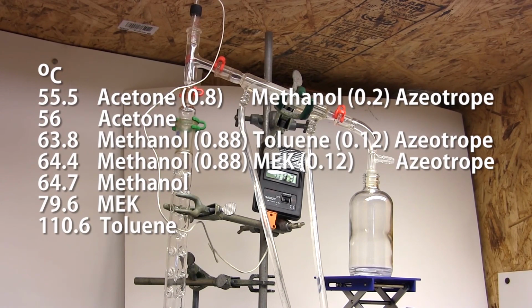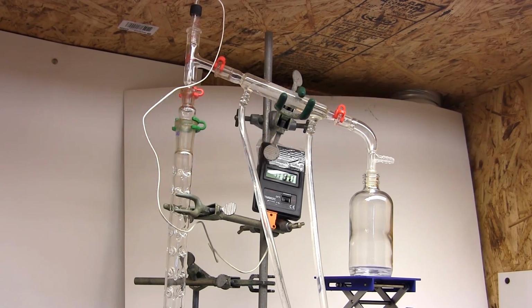Perhaps I'm heating too much and overloading the column with vapor. I'm going to turn down the heat just a bit to slow down the distillation. Well, that sucks. Now it's going too slow and not reaching the top of the column at all. And yet I only dialed back the heat a small amount.